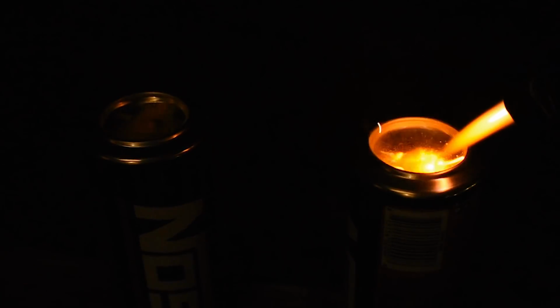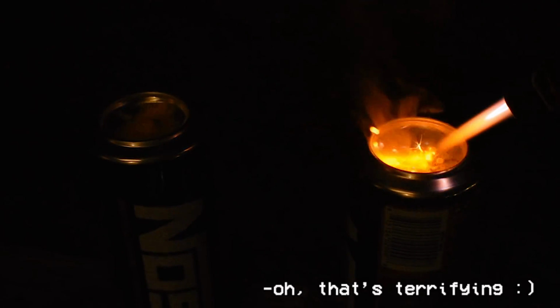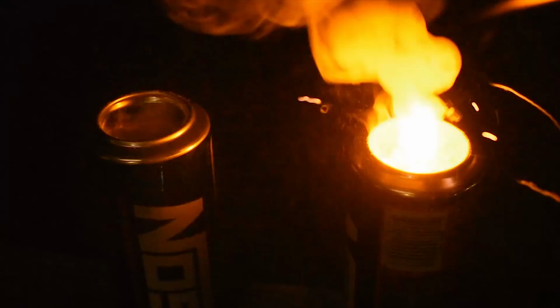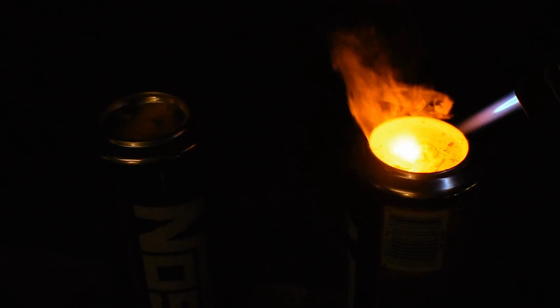Alright, so you might be able to see we're outside, and they're both on top of the soda cans, or at least overturned soda cans. So yeah, the nitrite mixture is on the right, while the perchlorate mixture is on the left. So I'm just going to go nitrite first, I guess. Oh, that's terrifying. It's not lighting up. Okay, so let's see how the perchlorate does, and let's also see if it kills me.